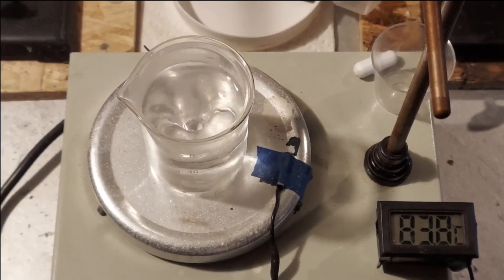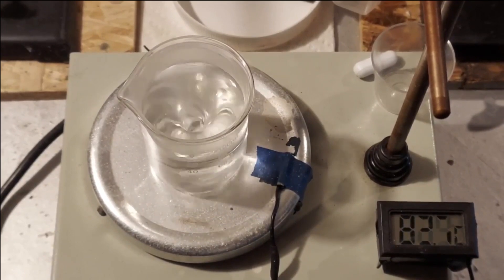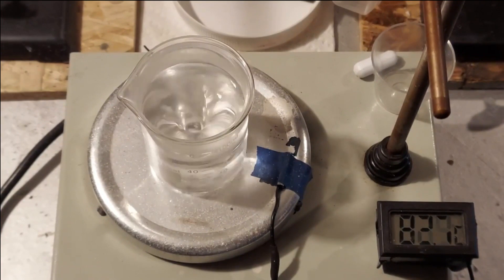So this has been mixing for about 10 minutes. I got it all in there. You can see that there is still quite a bit of the potassium bisulfate that has not dissolved. So don't get discouraged. Just keep waiting.